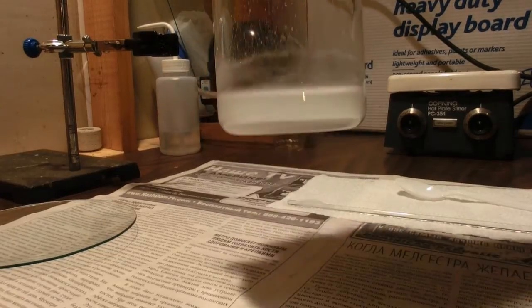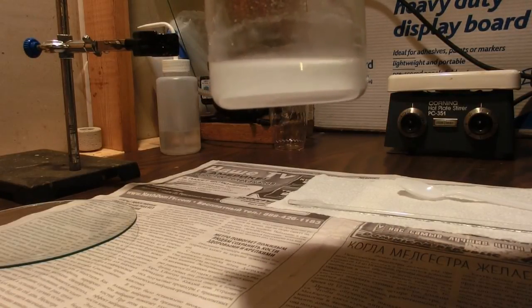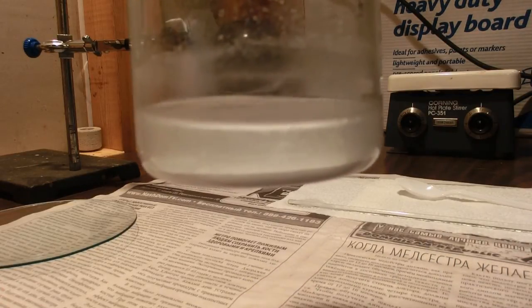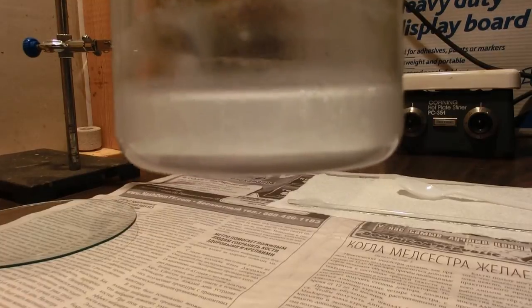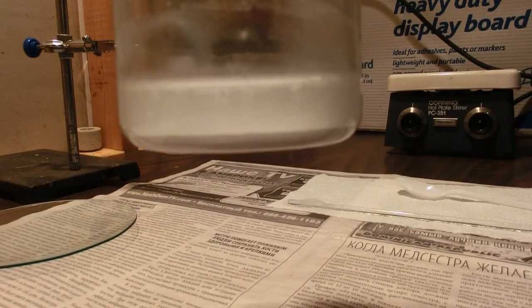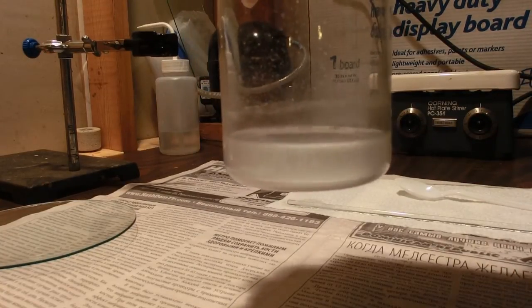Okay, after about adding 13.6 grams of sodium bicarbonate, major bubbling stopped. As you can see, there's still some effervescing going on there. And you see a white precipitate at the bottom of this beaker which is our white lead. So next I'm going to put it on a hot plate.